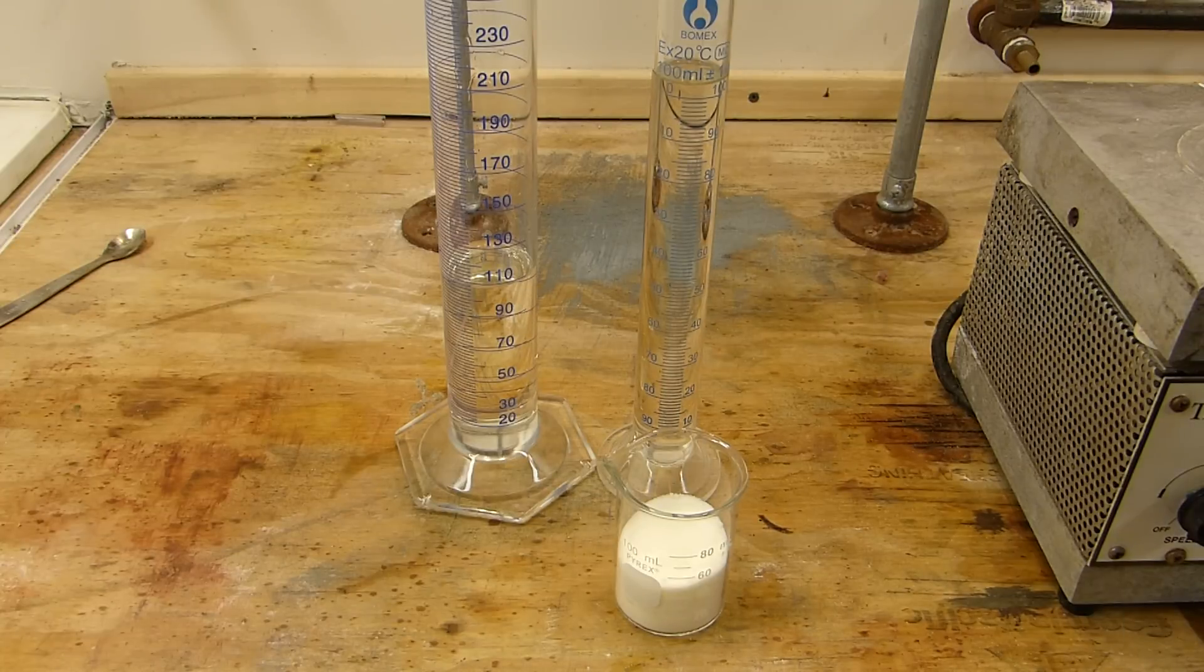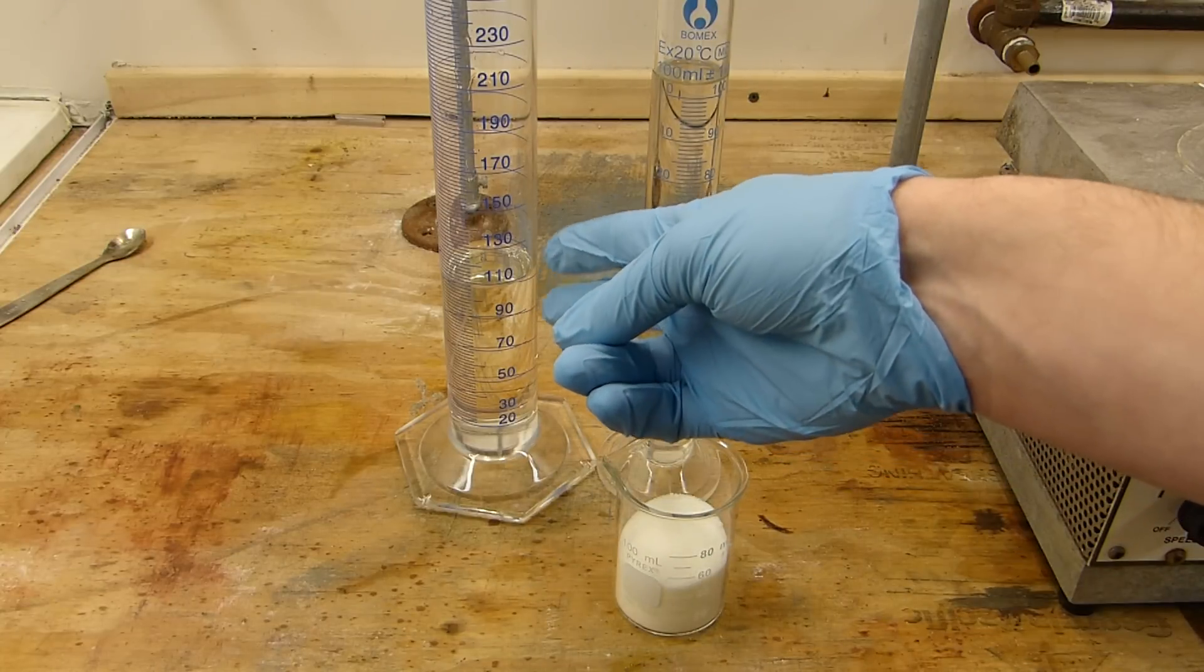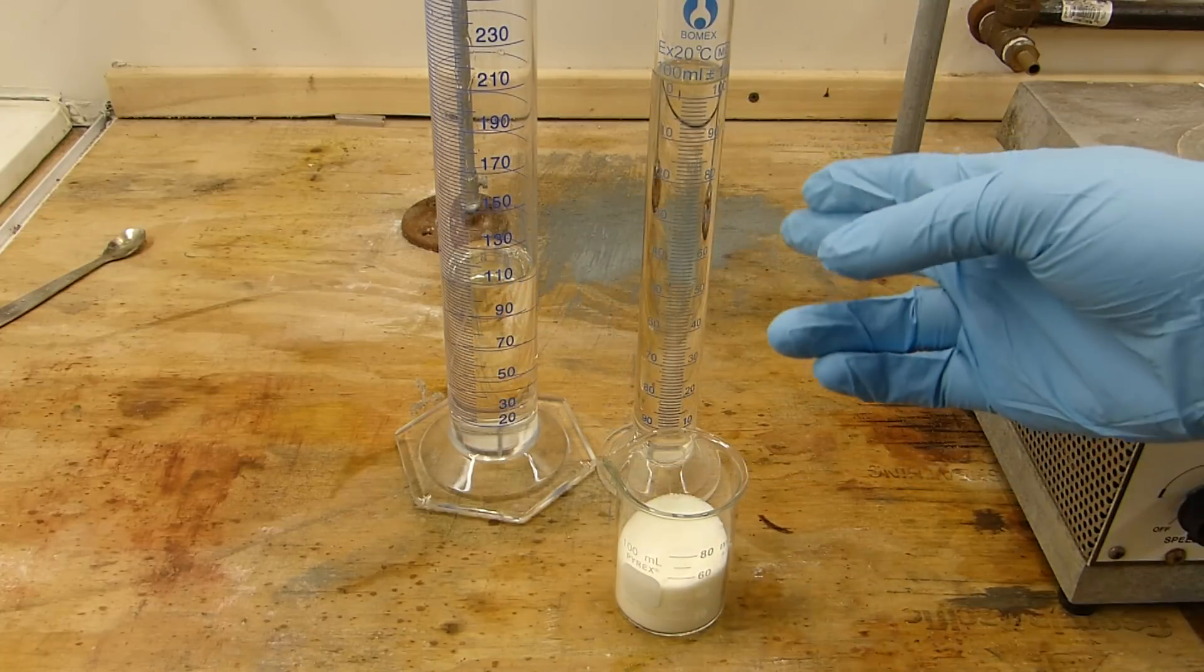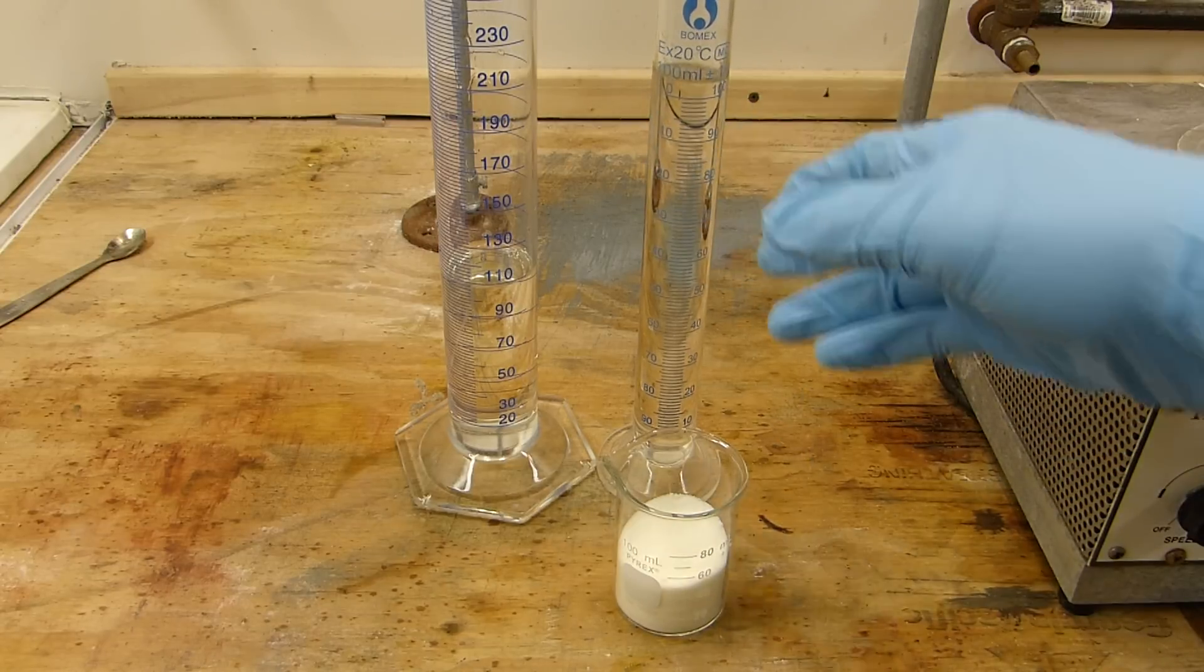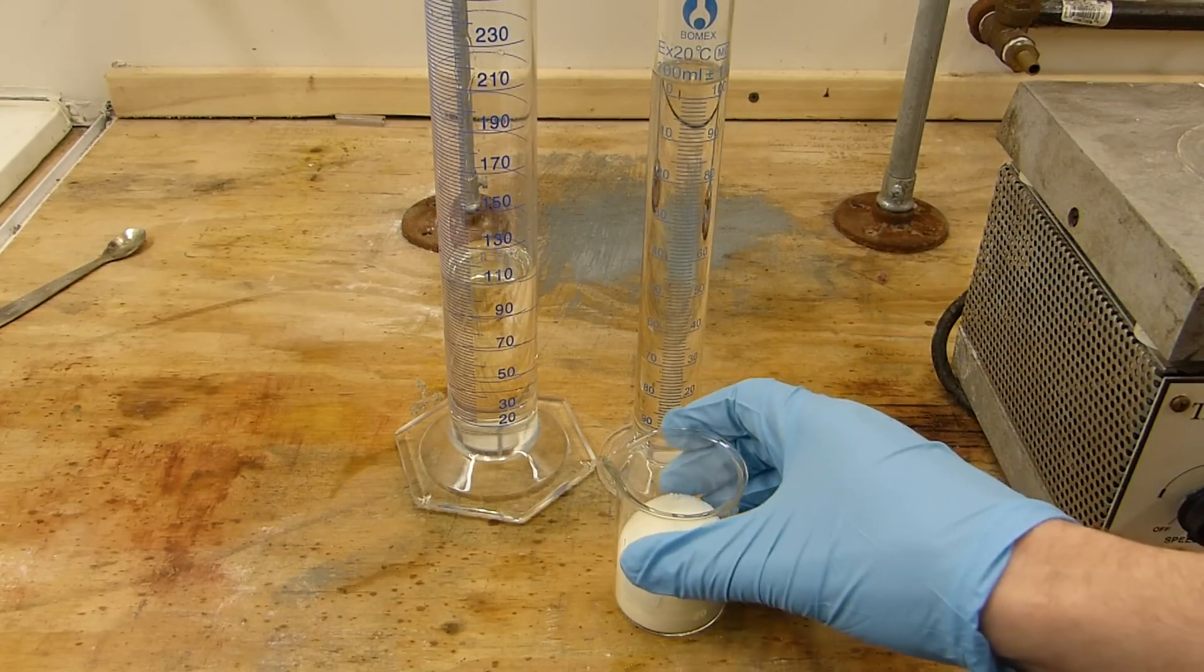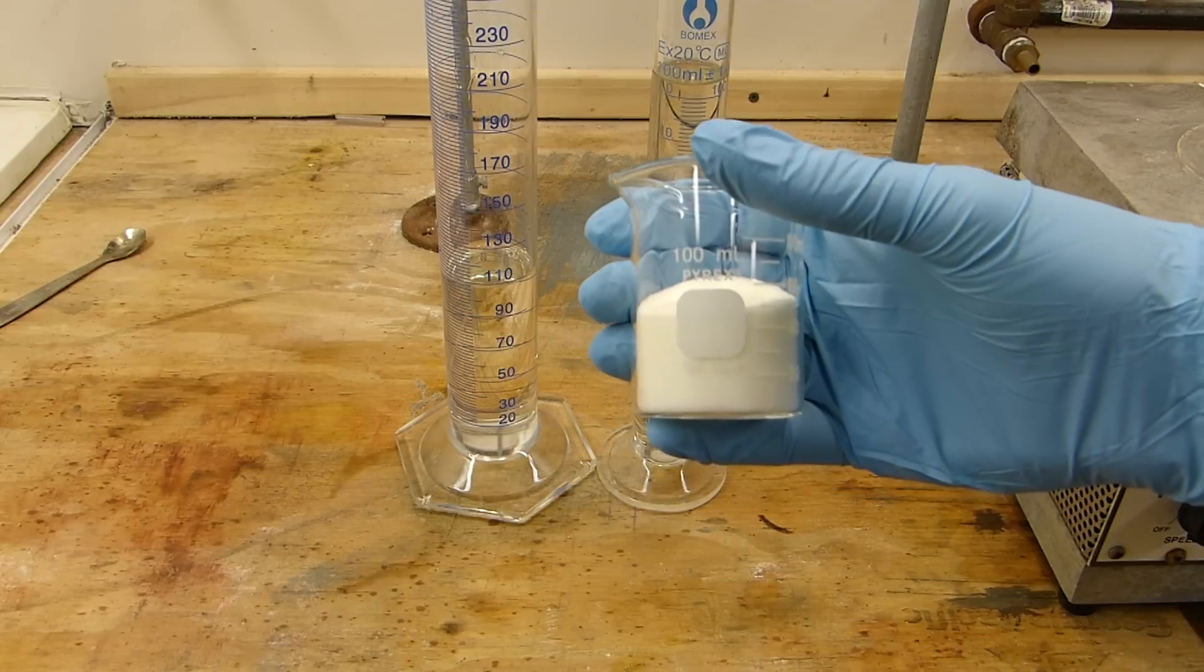Here are the prepared reactants including 121 grams of 30% hydrochloric acid, 86 grams of 70% isopropyl alcohol, and 69 grams of technical grade sodium nitrite.